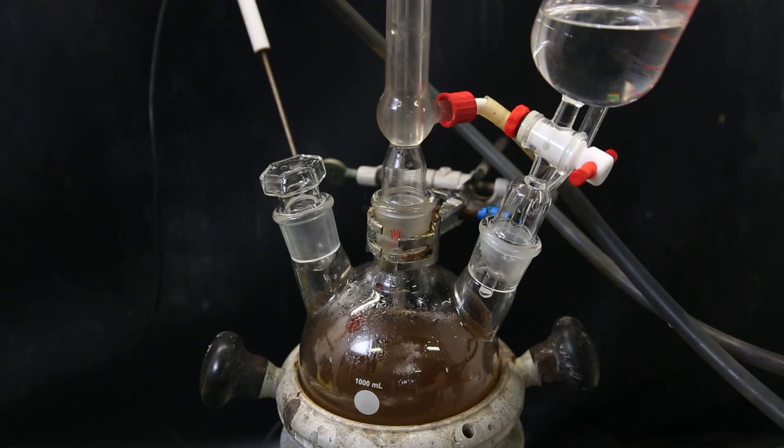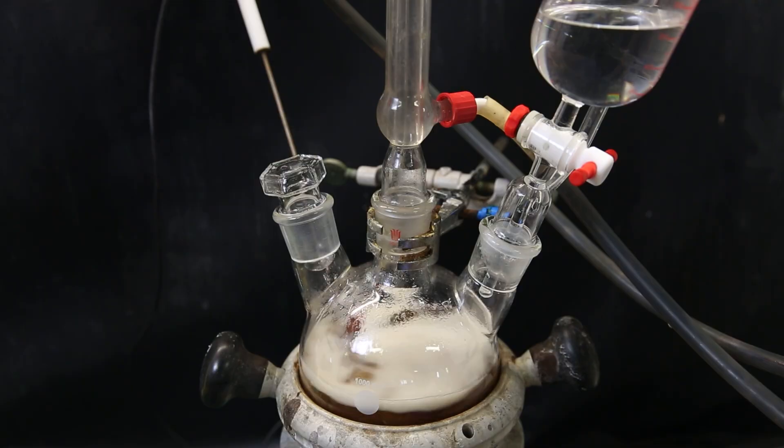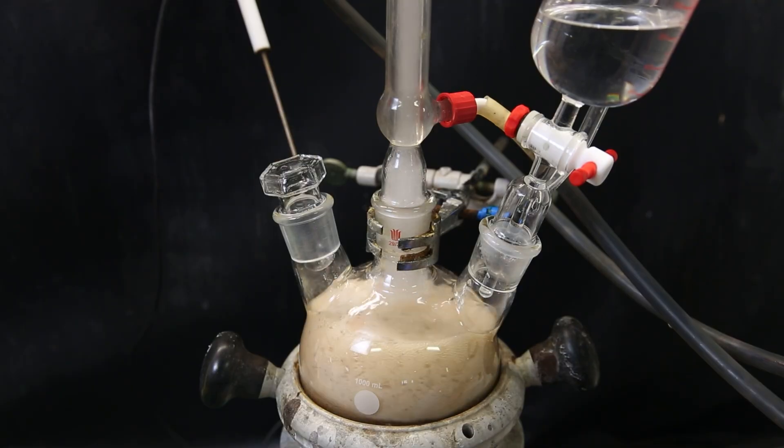As typical, it starts to go absolutely insane, because I added a little bit too much of the bromobenzene already. Luckily, it wasn't an issue, and the condenser kept everything inside.